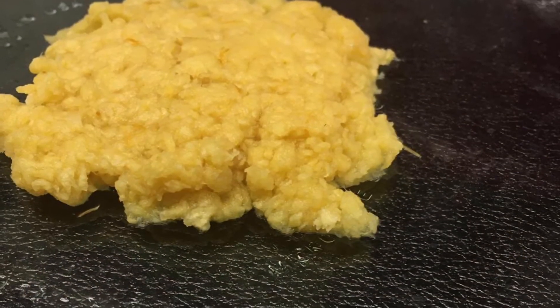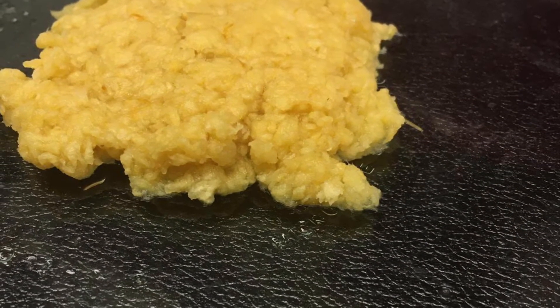It's very yellow — not your typical nitrocellulose.